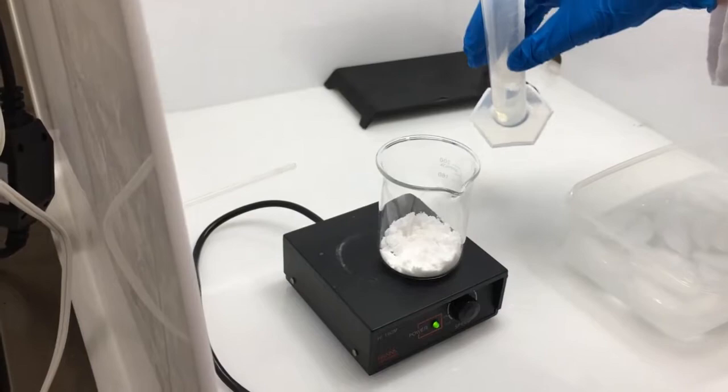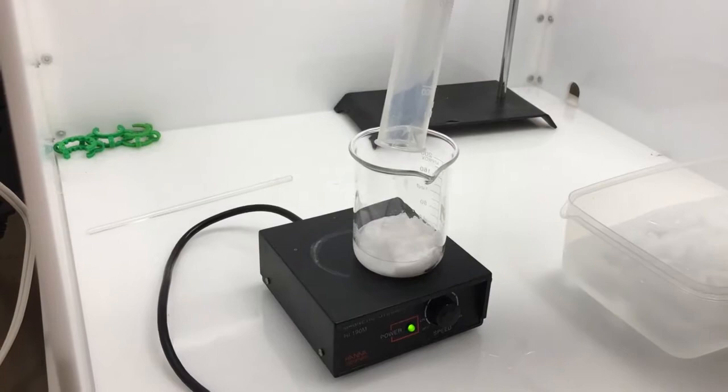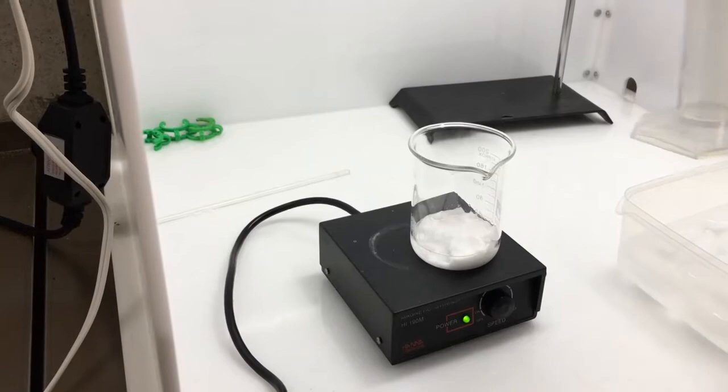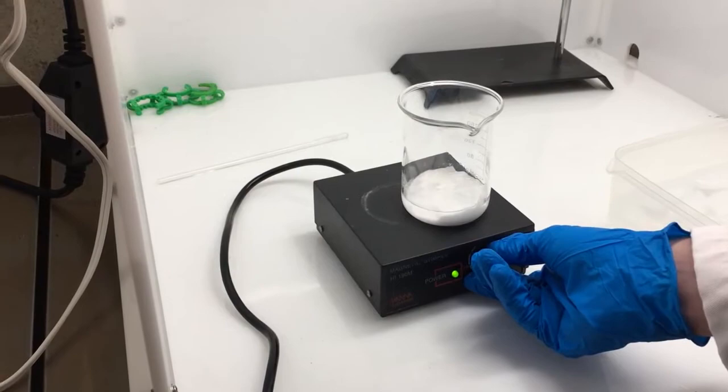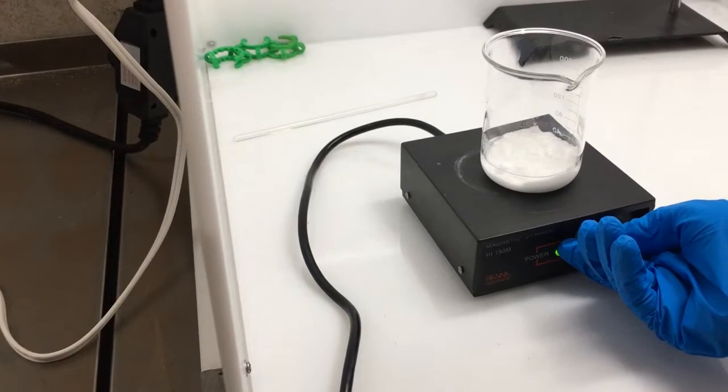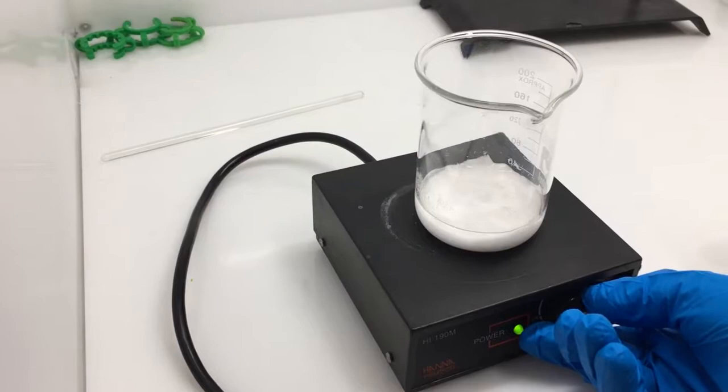Here's probably a good time to mention that anything from this point on is extremely toxic, and you probably want to wear a respirator, and you should definitely have gloves on. Hydrazine fumes probably will be generated, so I covered the beaker with plastic wrap to limit exposure to vapor and to limit my exposure to hydrazine, even though my fume hood probably carried it all away if any was present.